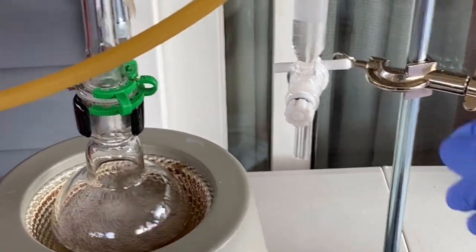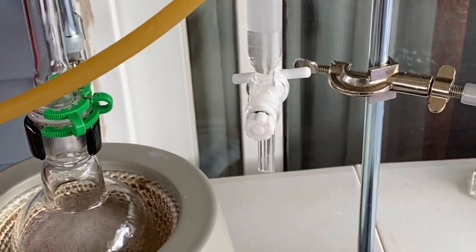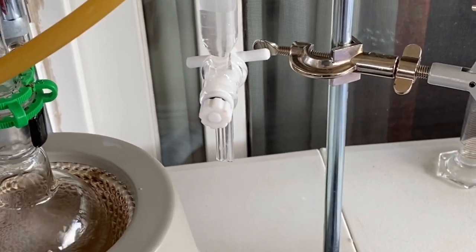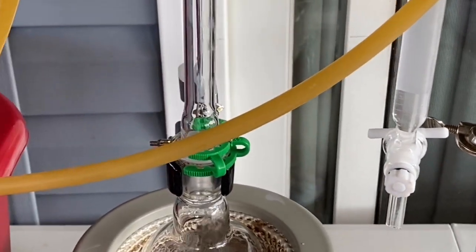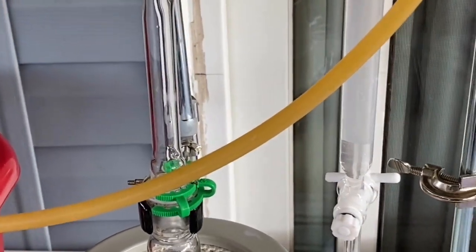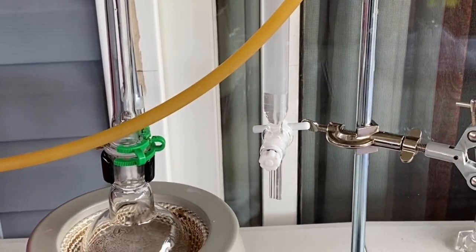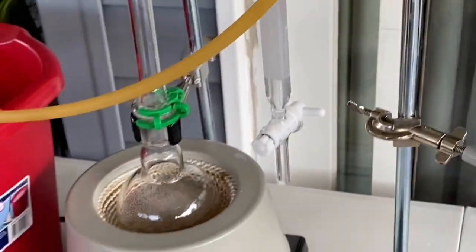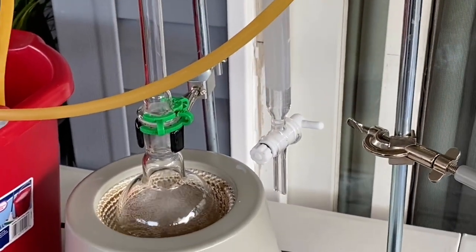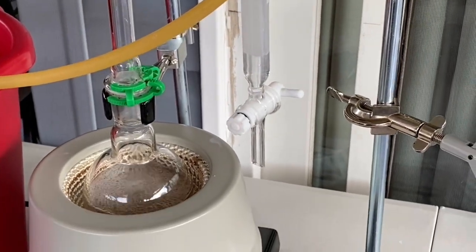My bad. And it will crash out. I don't remember off the top of my head if it's insoluble in both or whatever. So it will crash out of that, and we'll be able to vacuum filter it, and then we will be able to purify it further by putting it in a water bath and melting it and allowing any excess toluene in water to boil off.